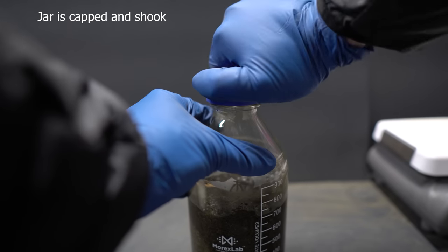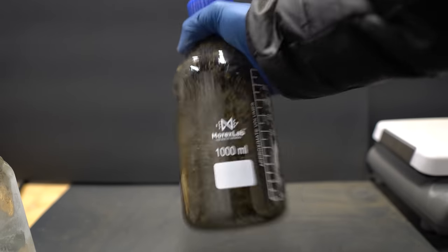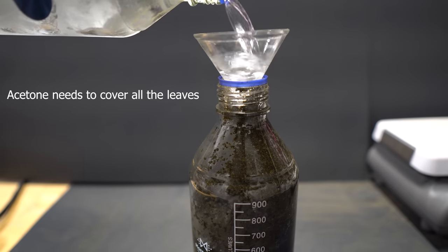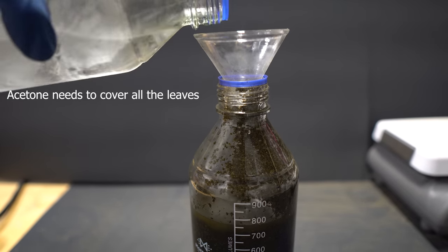It's also going to be important to make sure that your cap is on tight as the plant material will get in between when you shake. When I poured the acetone in initially I thought it covered all the leaves, but I had to add more as the leaves absorb some of the acetone.